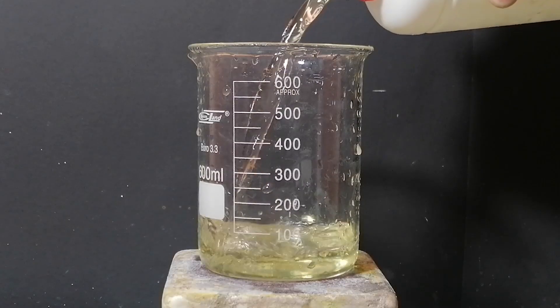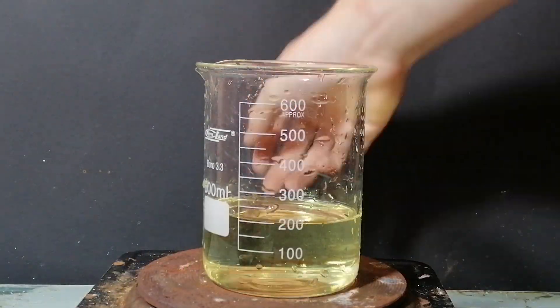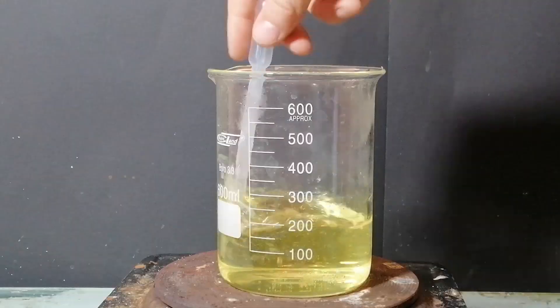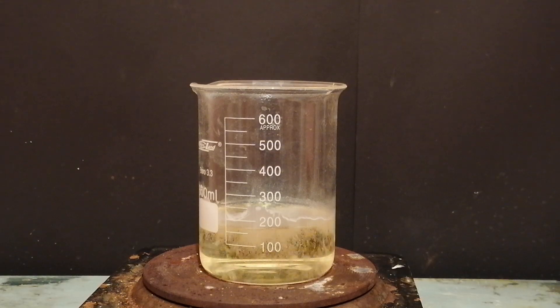So first I've added around 200ml of 15% concentrated bleach to a beaker. Then I put it on a hot plate and let it rip. As the heat rises the mixture starts to foam up and the bleach loses a bit of that green color.